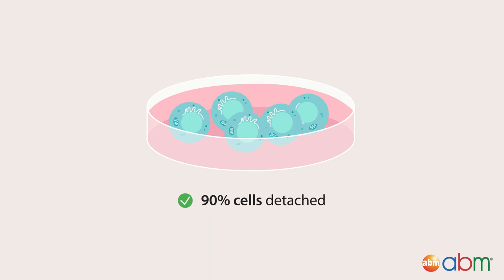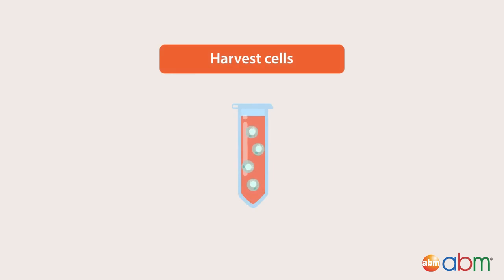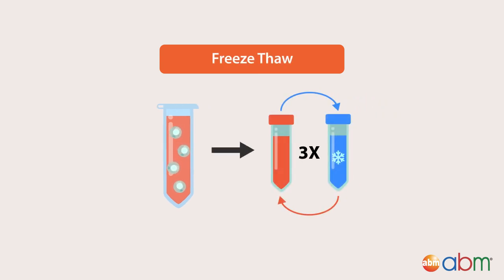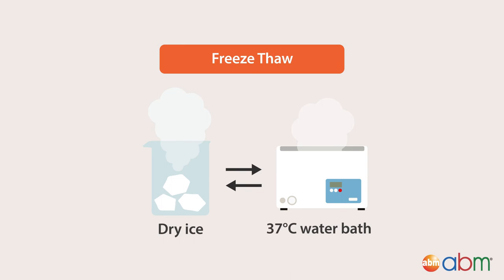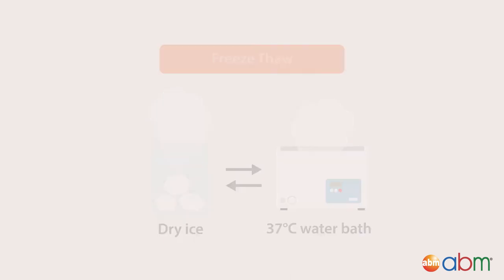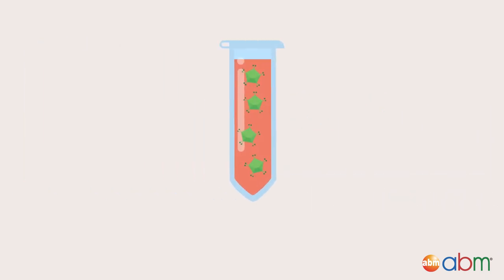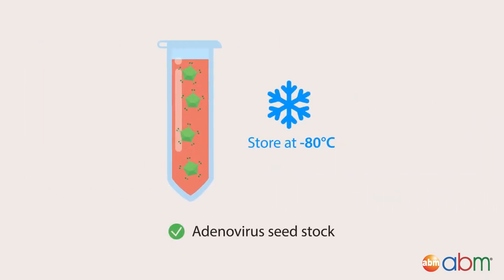Subculture them from the 6-well plate into a 15 cm plate with 20 ml of complete media. Monitor your cells over the next 7 to 14 days for signs of cytopathicity, characterized by rounded, swollen cells that detach from the plate. When approximately 90% of the cells have detached, harvest the cells in a 15 ml conical tube. Freeze and thaw the cells 3 times to ensure complete lysis by alternating between dry ice and a 37 degrees Celsius water bath. You have now isolated your adenovirus seed stock.